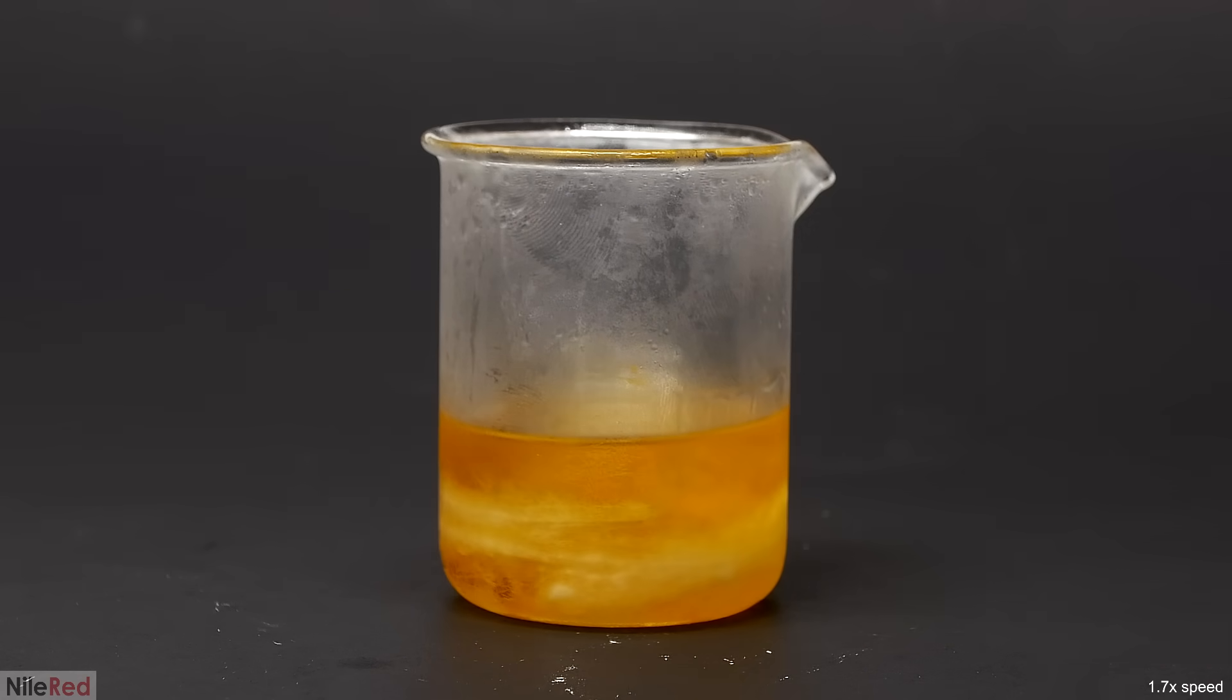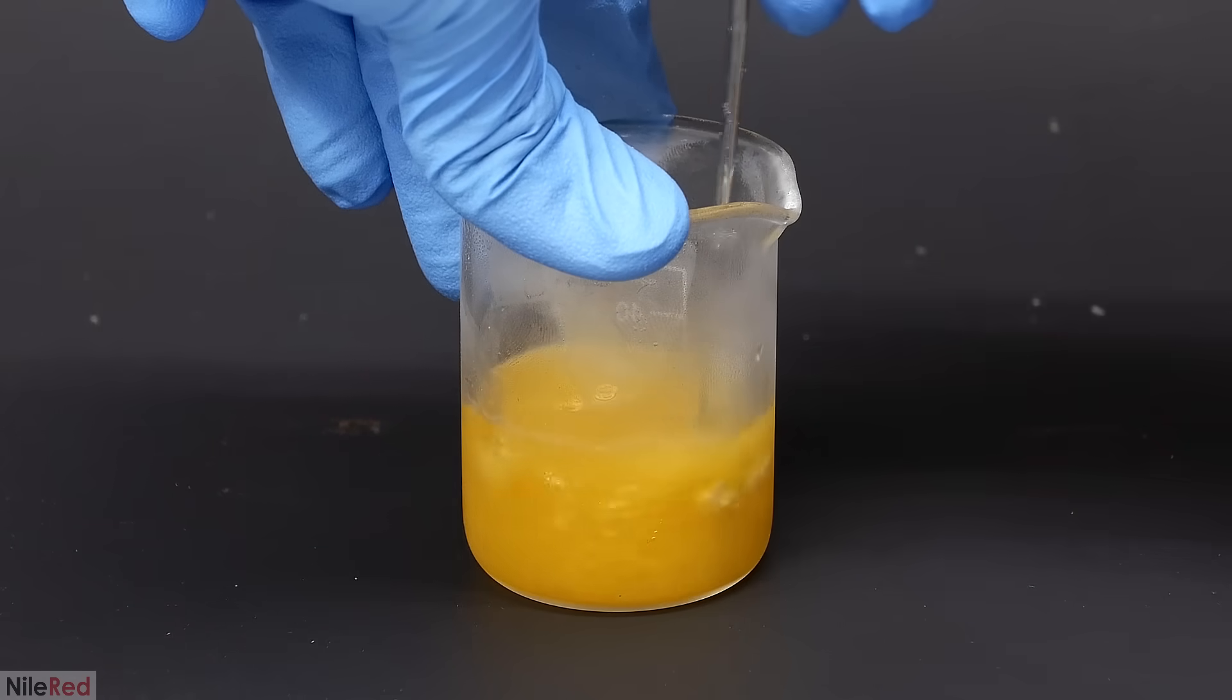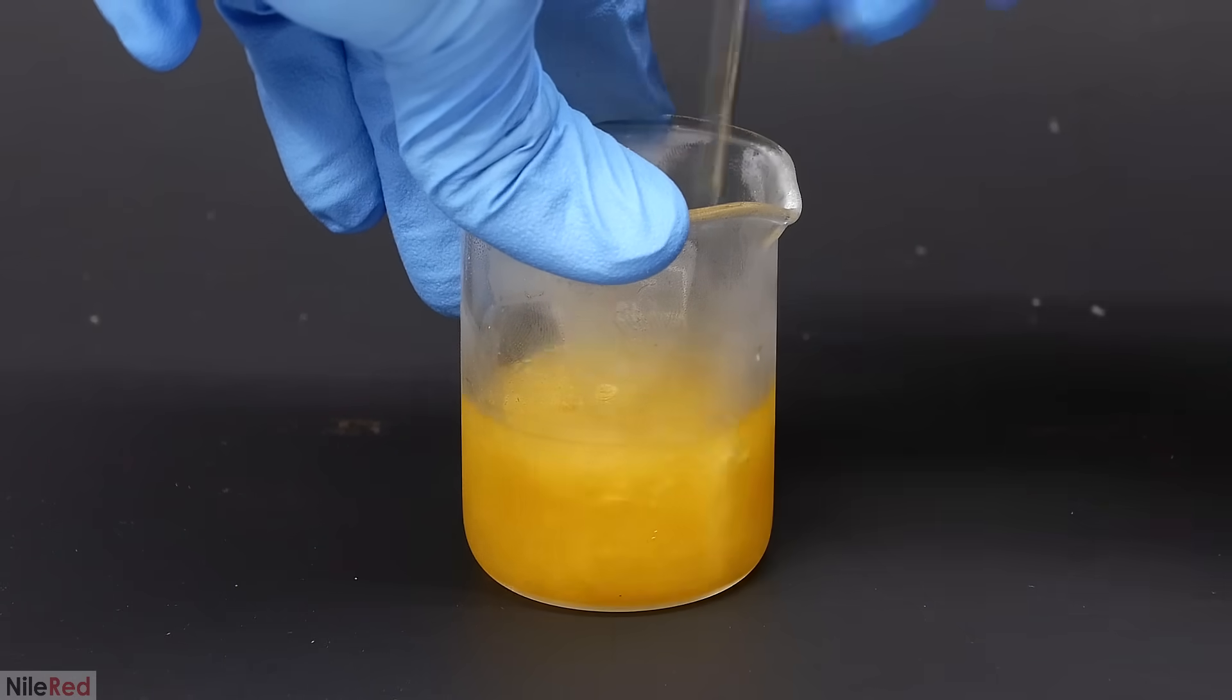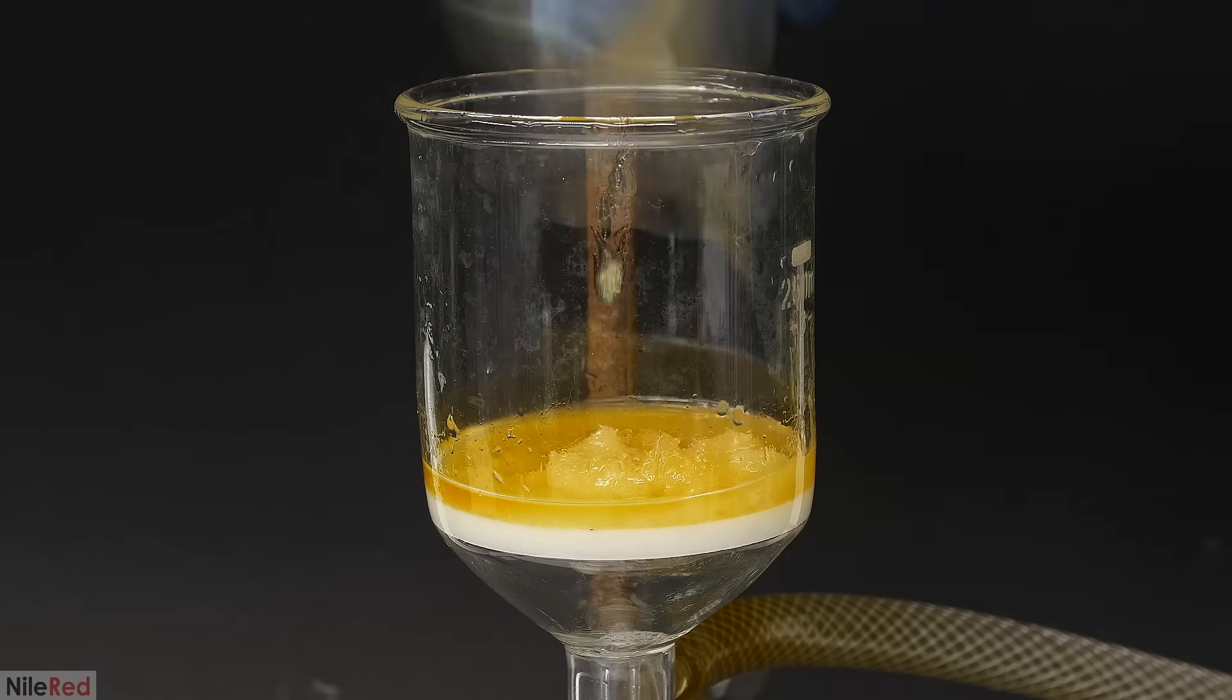This does happen sometimes though, and crystallization just needs to be induced by scraping the wall a little. To finalize the crystallization, I put it back in the freezer for a couple hours. Then, as usual, I broke it up into pieces and filtered it off.